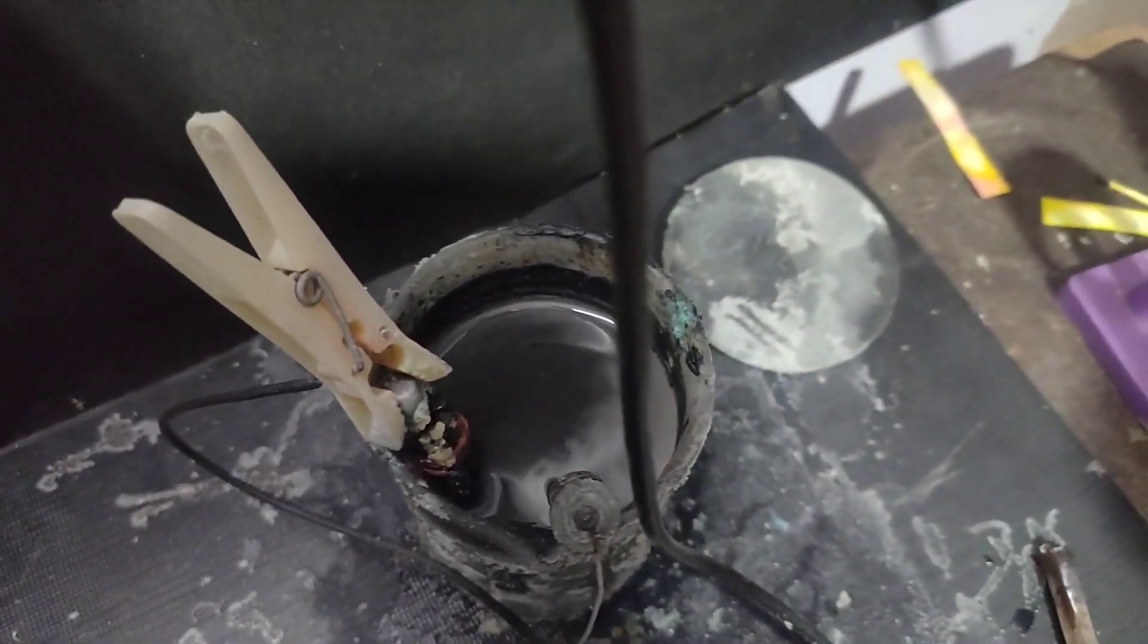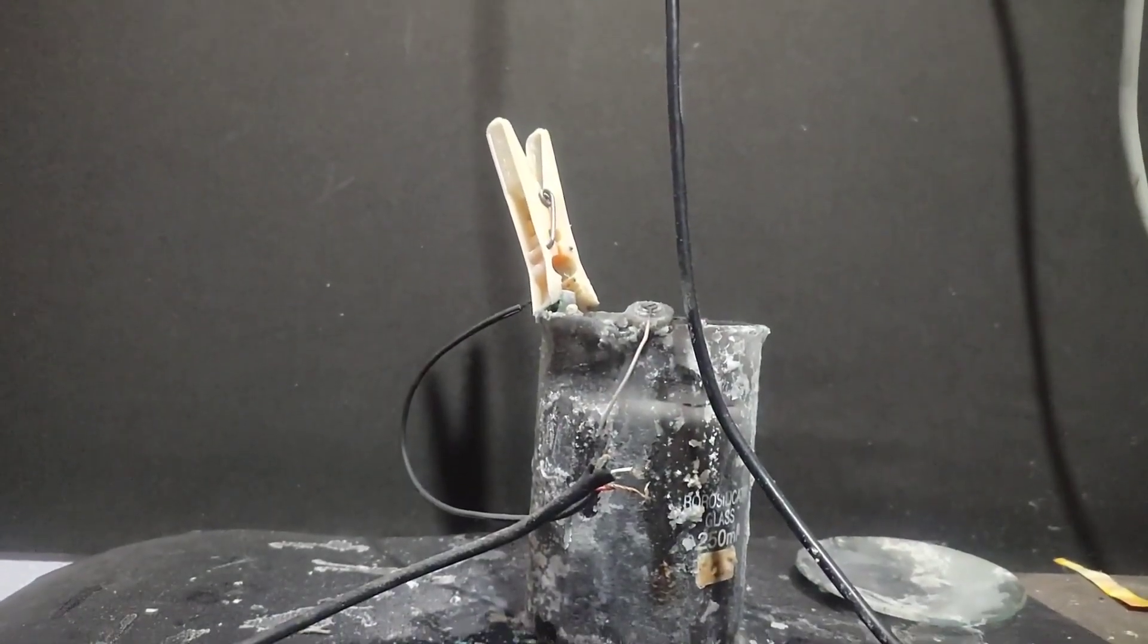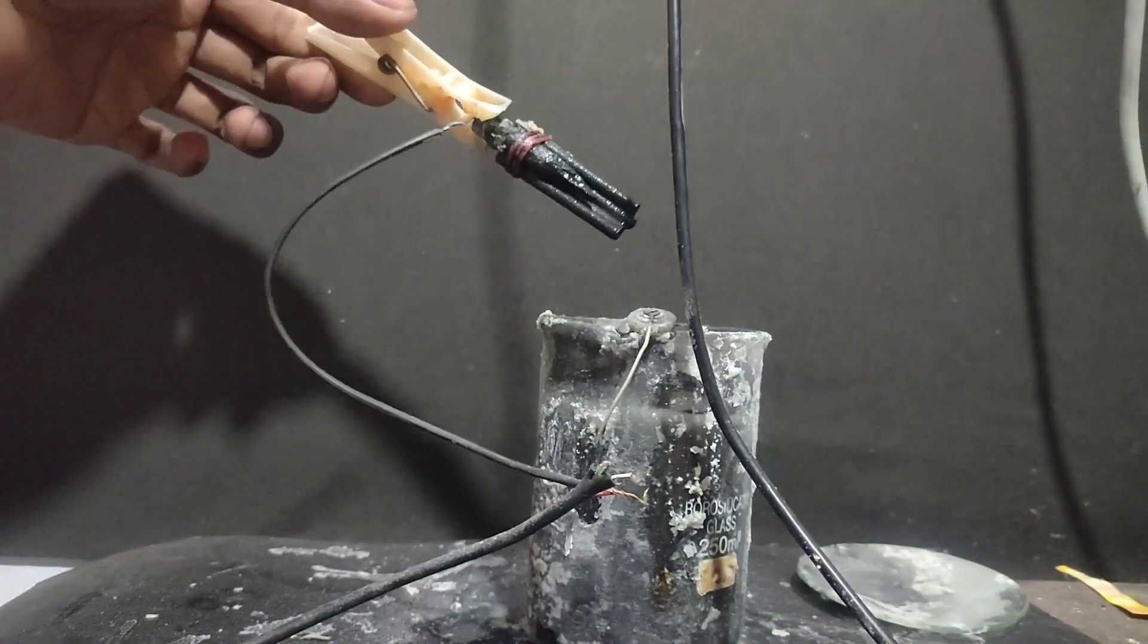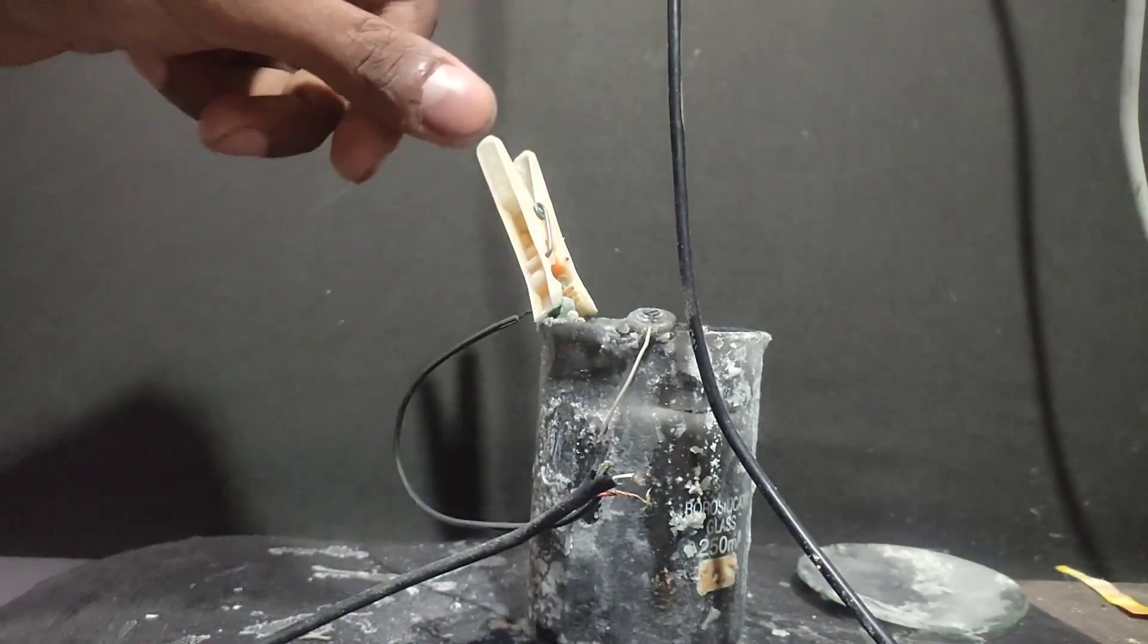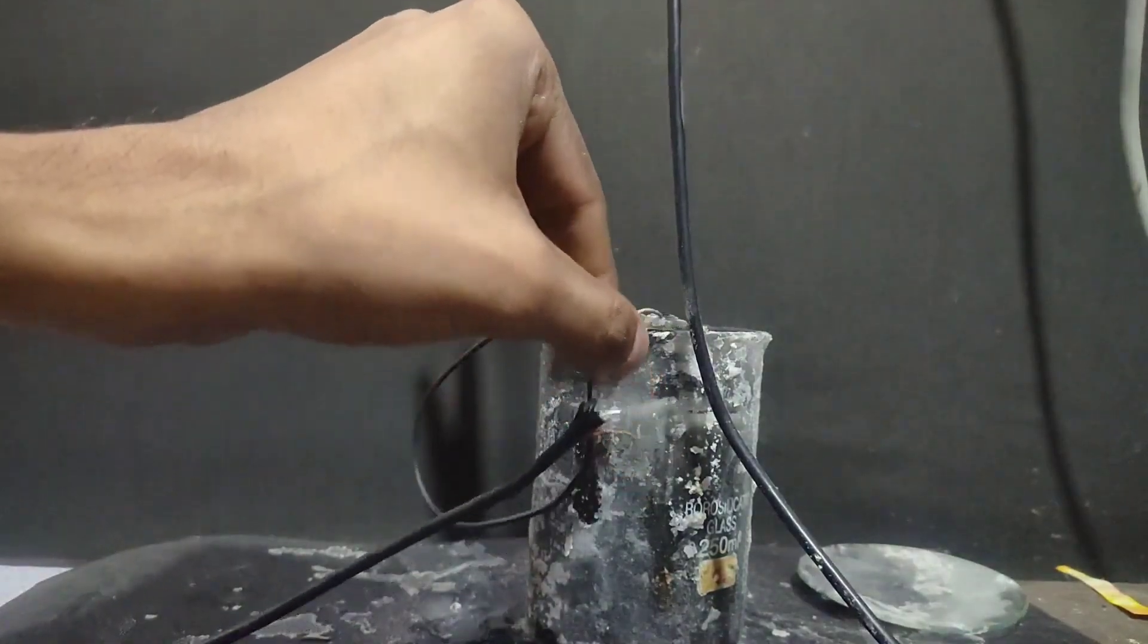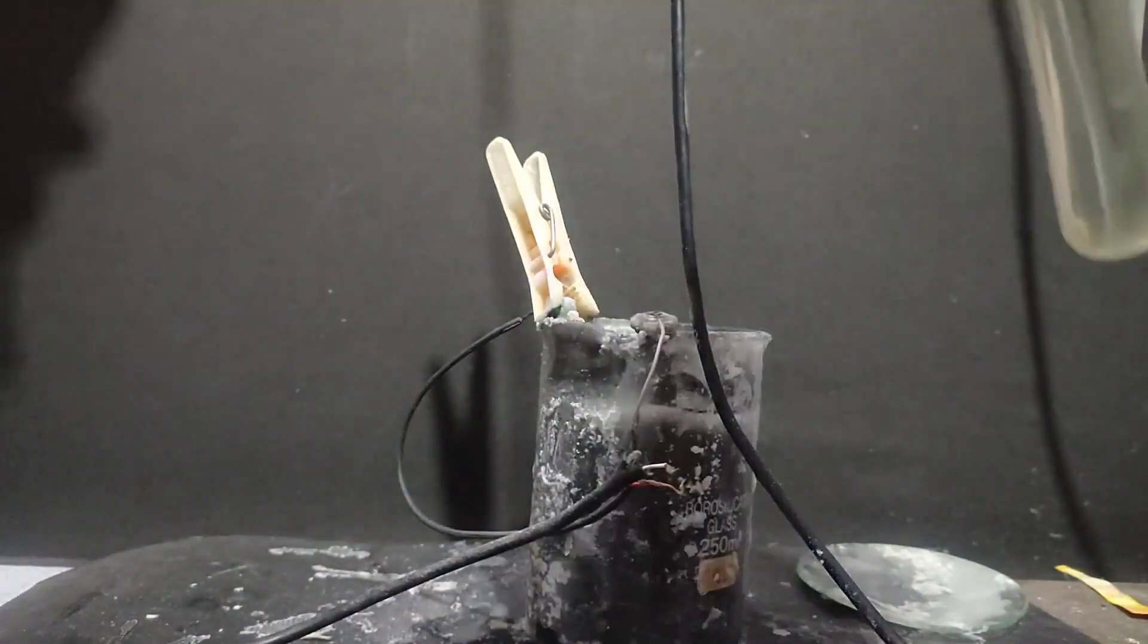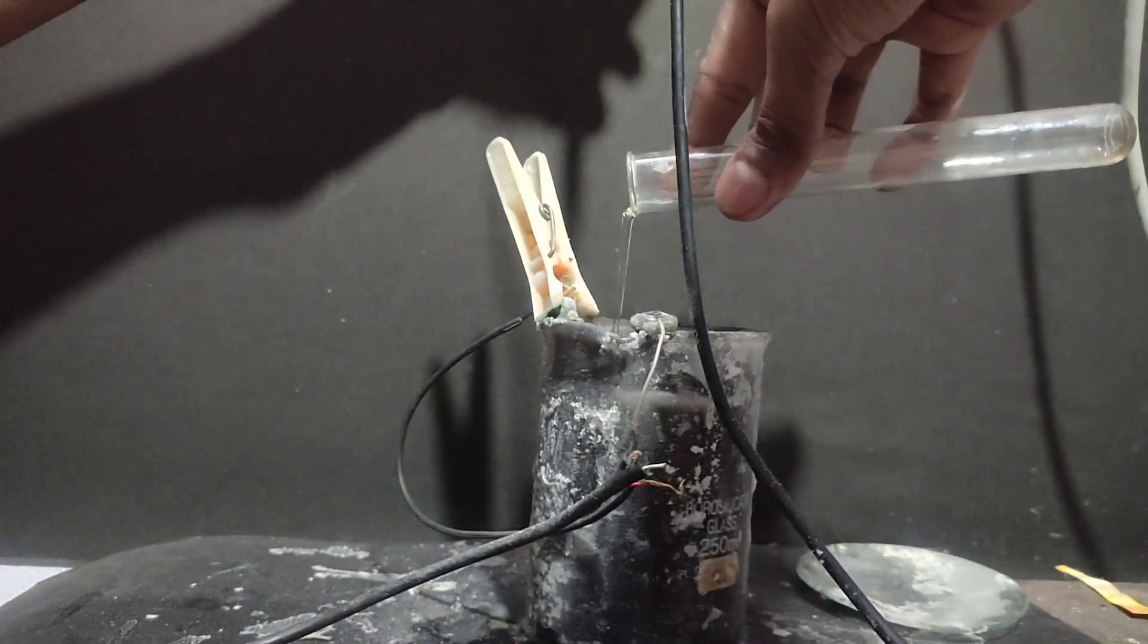After one day my electrochemical cell looked like this and the solution had turned black. I had placed some more electrodes onto the main electrode so that the surface area is increased and more current is passed through the solution. I added more saturated potassium chloride solution since potassium chloride is consumed in this reaction.